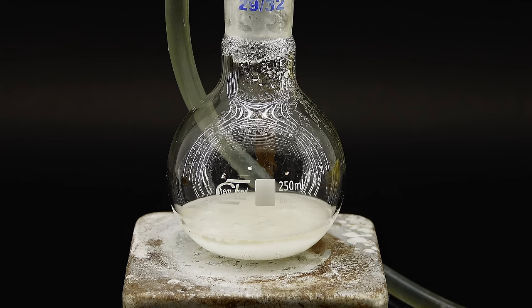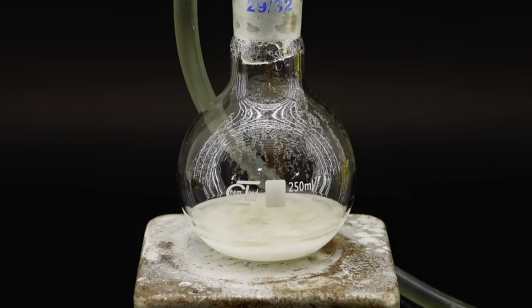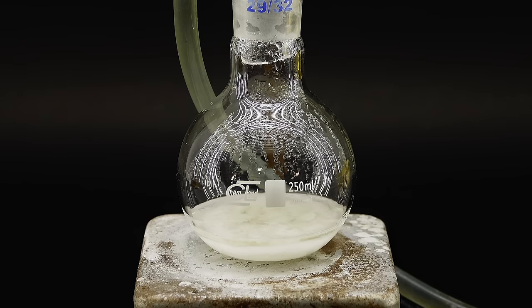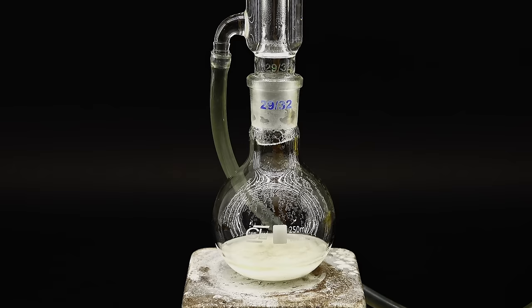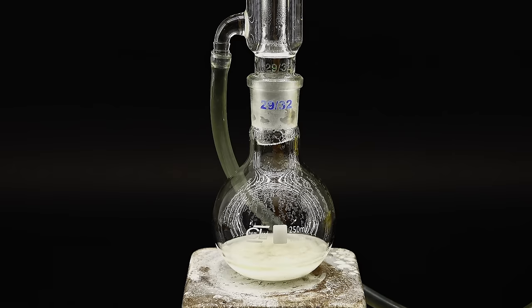Anyway, this reaction is just a simple neutralization that through the interaction of sodium hydroxide and hydrazine sulfate produces hydrazine, sodium sulfate and water. All the added and created water helps tame the extremely flammable and toxic hydrazine, and combined with the reflux makes this whole thing relatively manageable. Anyway, even though pretty much everything finished reacting a few minutes after adding the water, I heated this mixture to make it boil for about half an hour to be absolutely sure of the reaction's completion and not accidentally ruin my yield again. When the 30 minutes were up, I was now left with a hot hydrazine solution with a ton of sodium sulfate dissolved into it. To get my hydrazine out, I had to carry out a distillation.